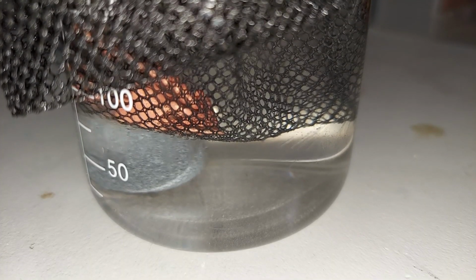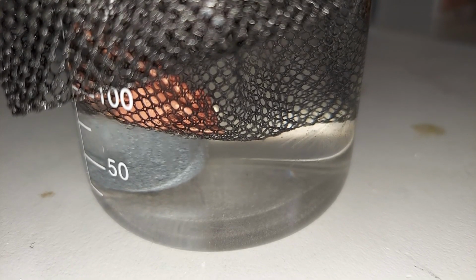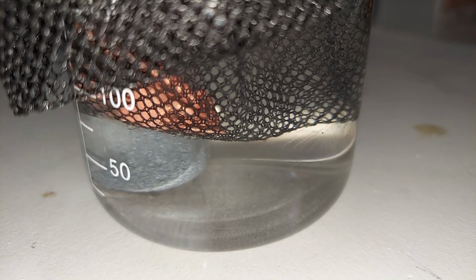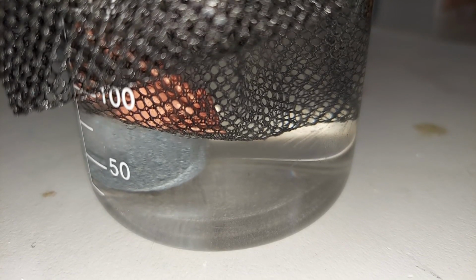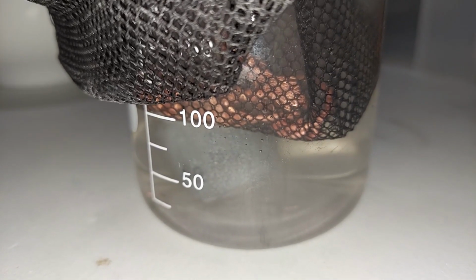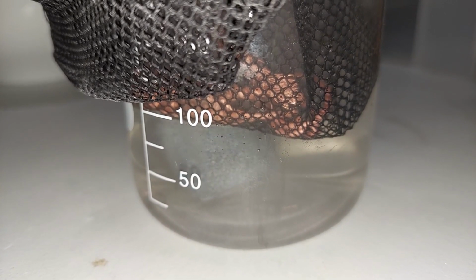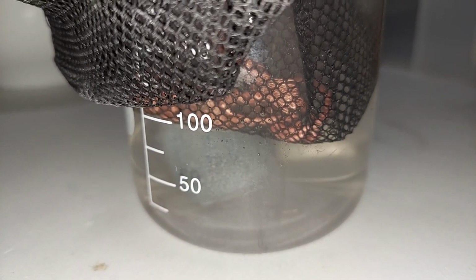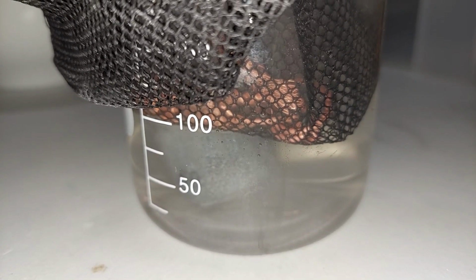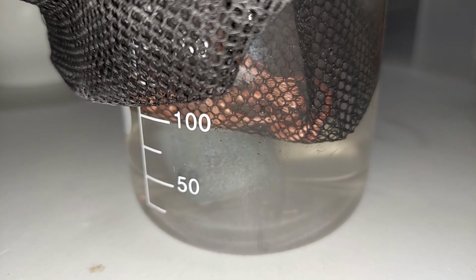We're 36 hours out. The solution's cleared up quite a bit. The copper is still there, of course. It's slowly getting degraded. The copper acetate that's forming will stay in solution, so we won't expect any kind of precipitate until we add the sodium carbonate. It's day 5 now. I have had to add more acetic acid to this beaker because it was, of course, evaporating. The copper is breaking down slowly, but not nearly as quickly as I imagined it would. So I'm going to let this run as long as I need to. We'll just come back and look periodically.